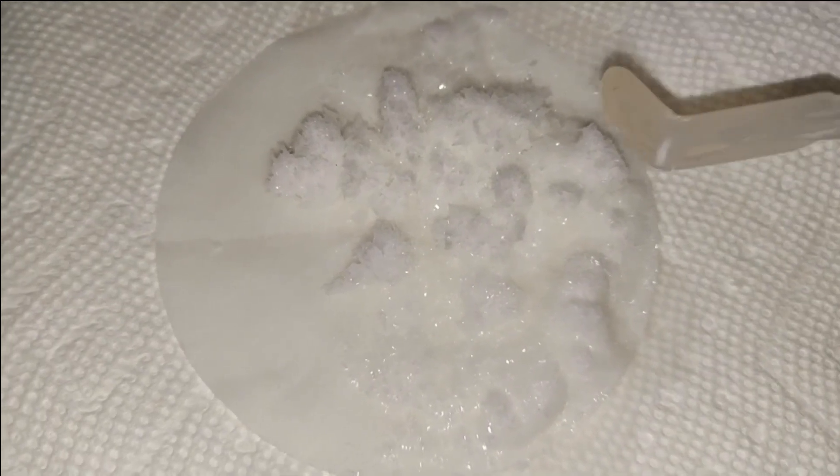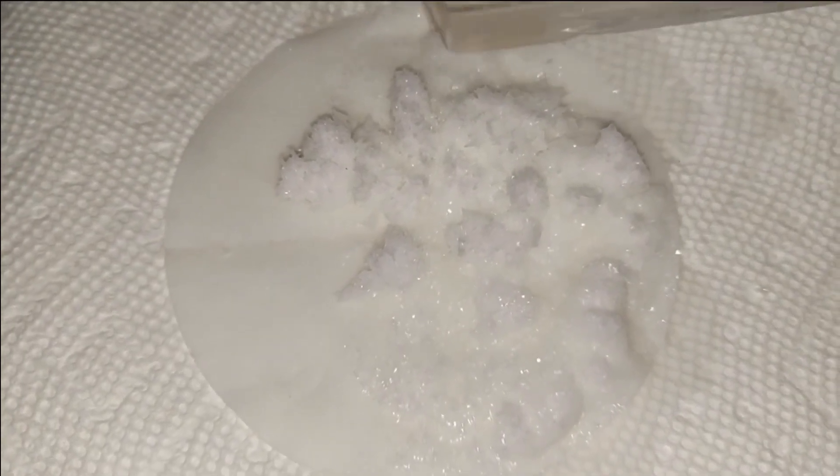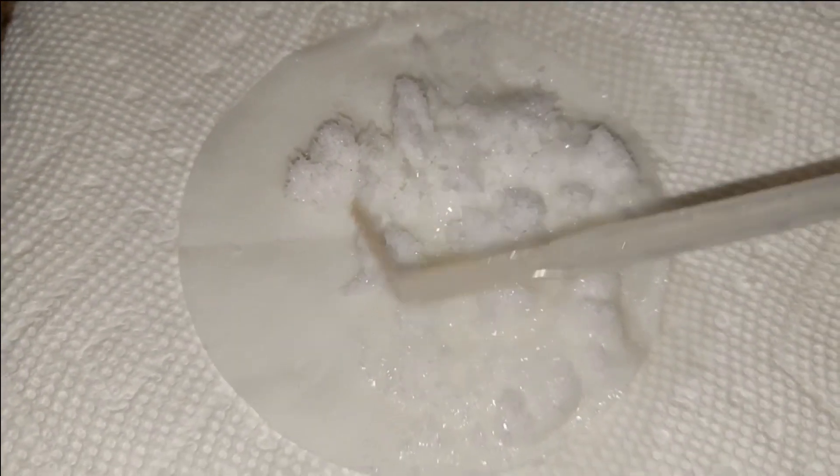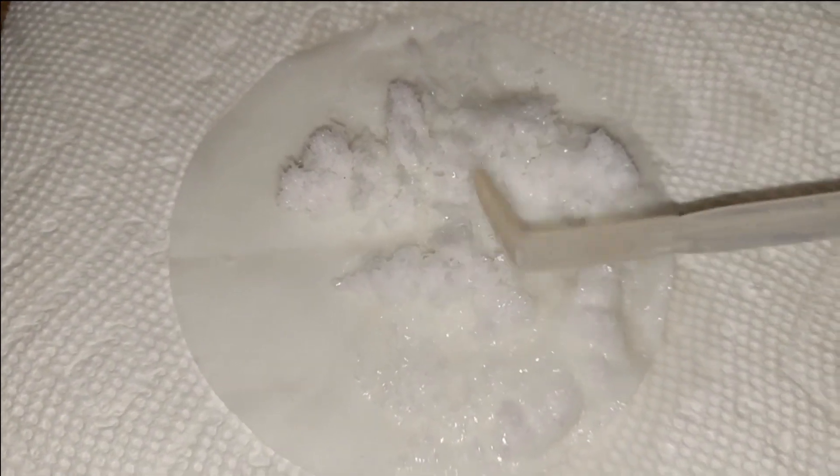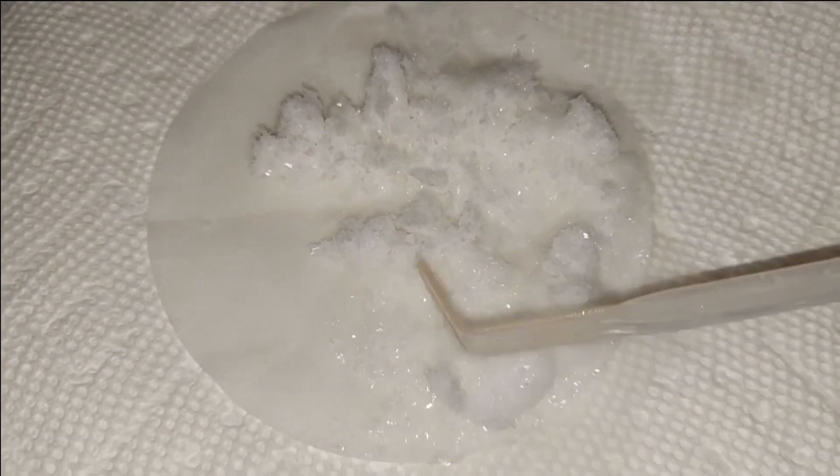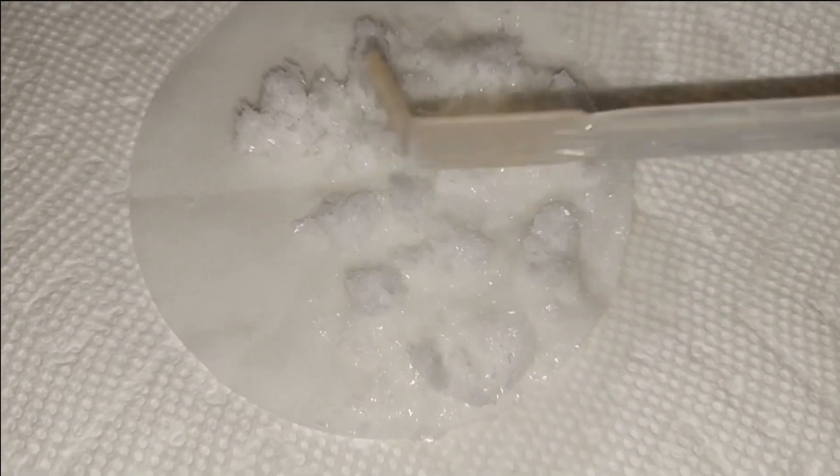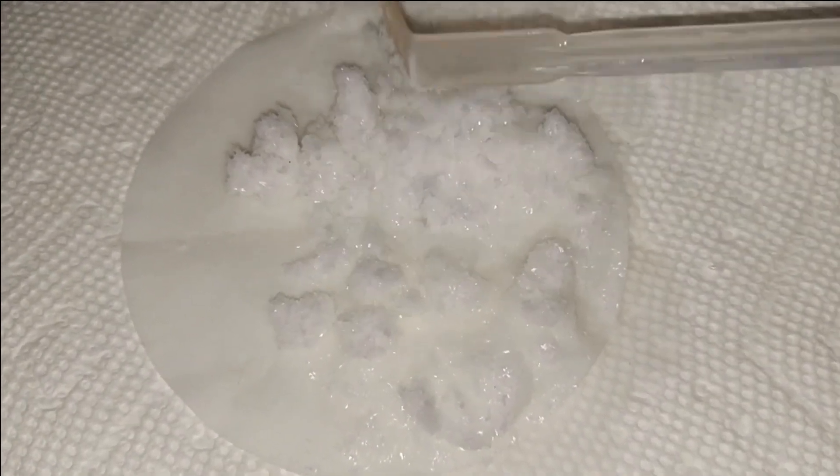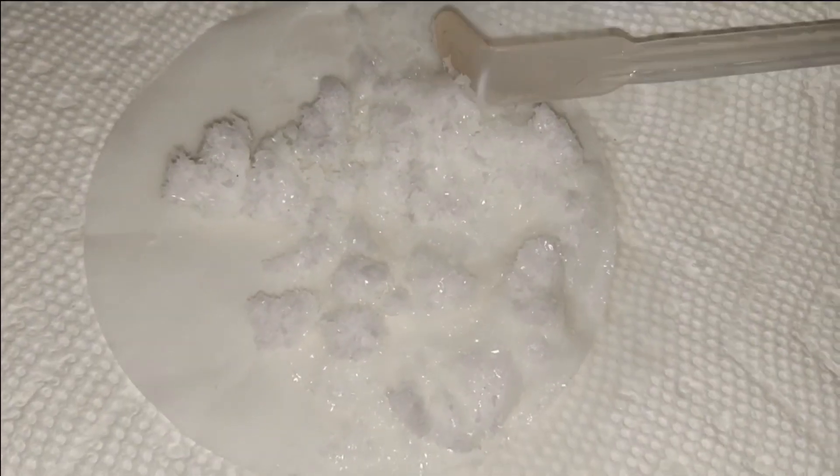Here's a pile of the washed but undried crystals. They're still pretty wet. Let them dry overnight, probably, to make sure they're completely dried. Then break up everything to a nice powder, and we'll finally have our long-awaited potassium persulfate.